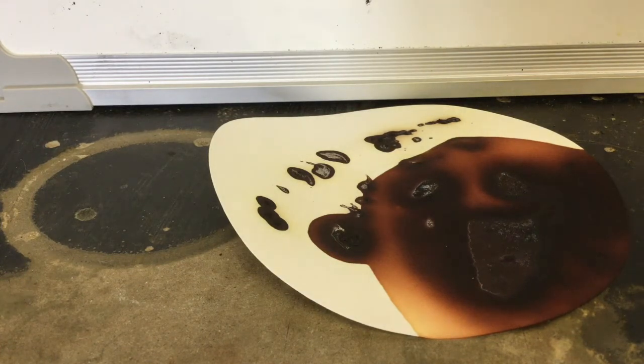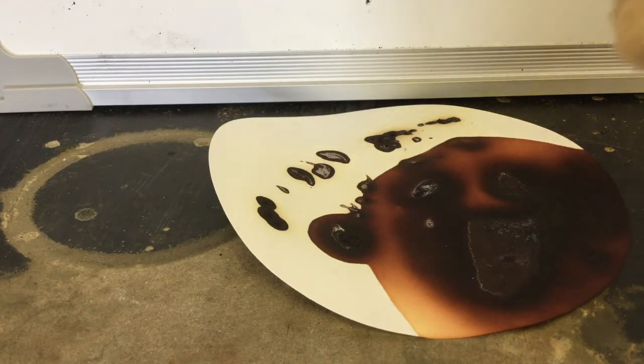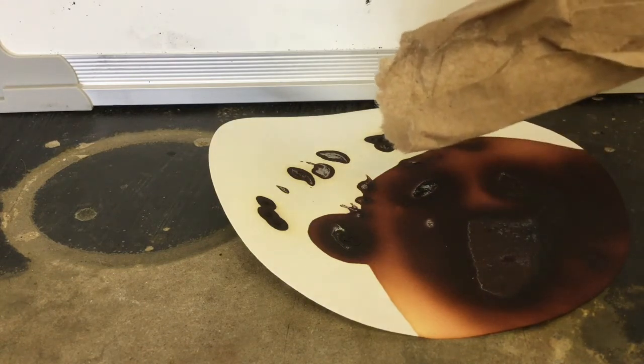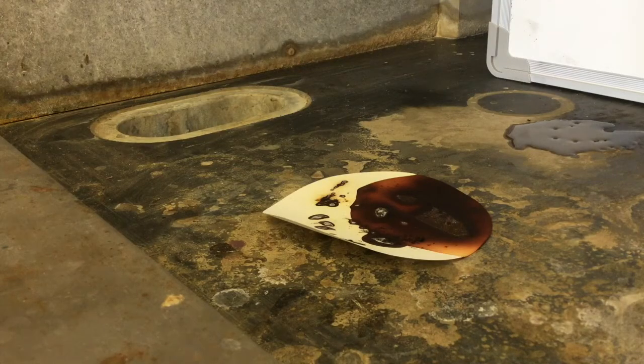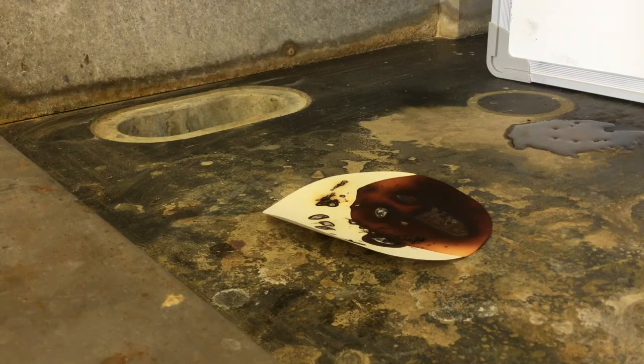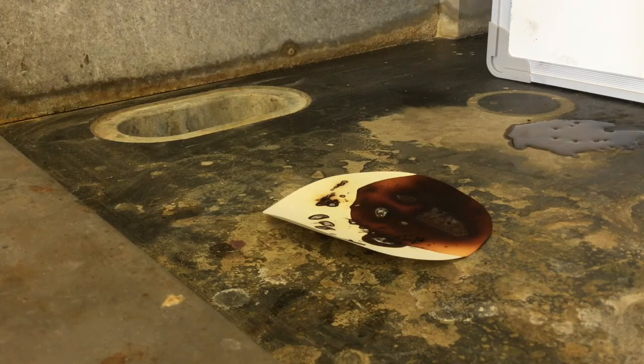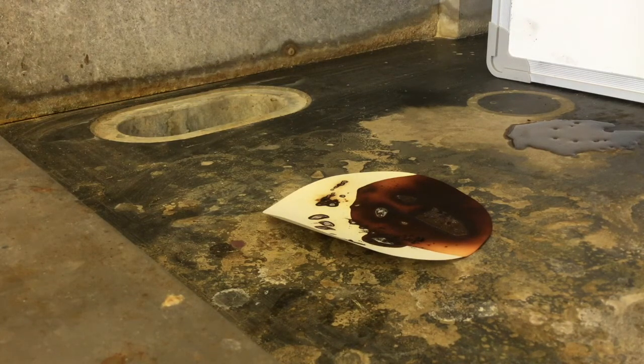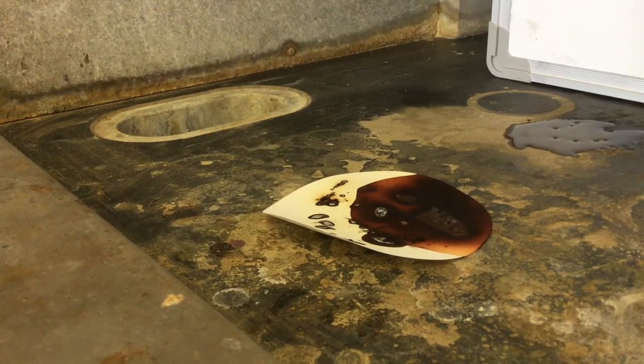We're going to try to set off the nitrogen triiodide by brushing it with this paper towel. I'm going to try to set off the larger spot here, and I'm going to use regular motion instead of slow motion.